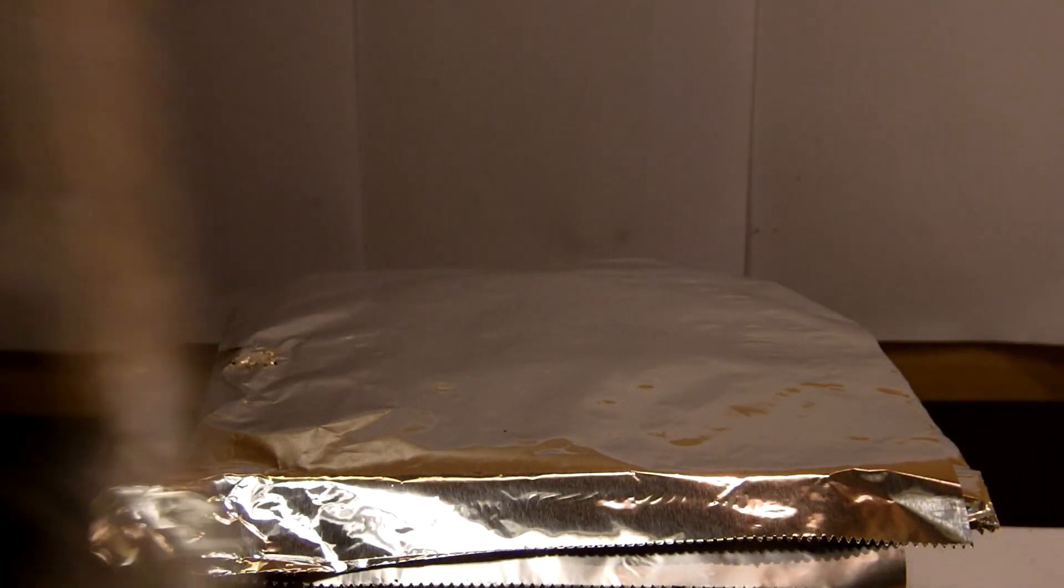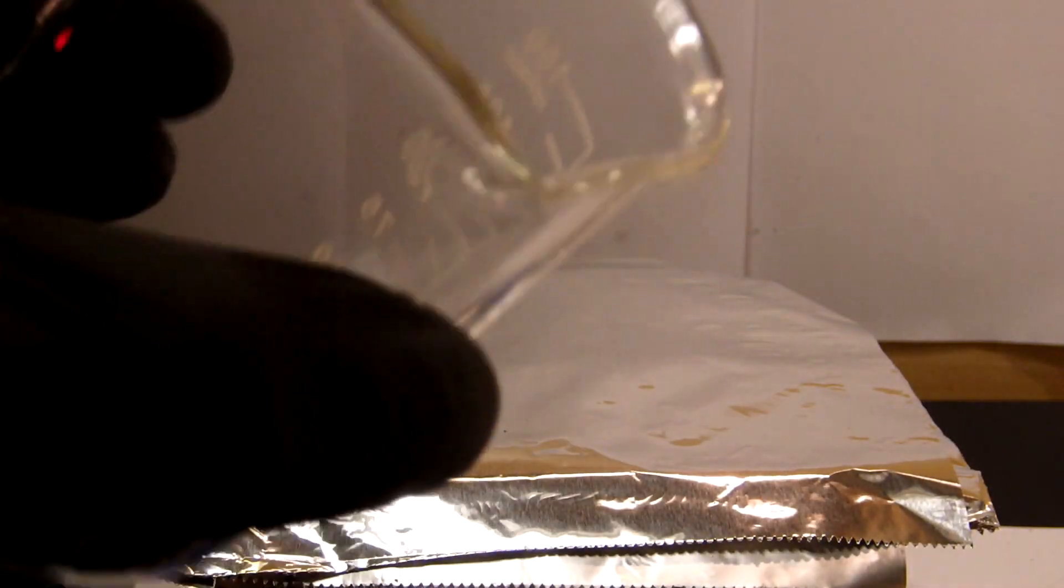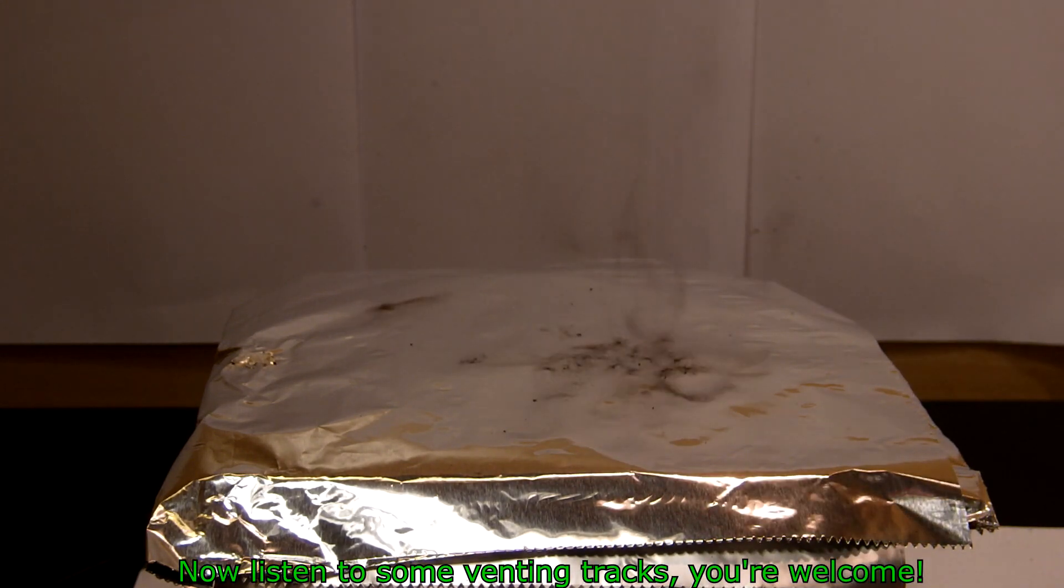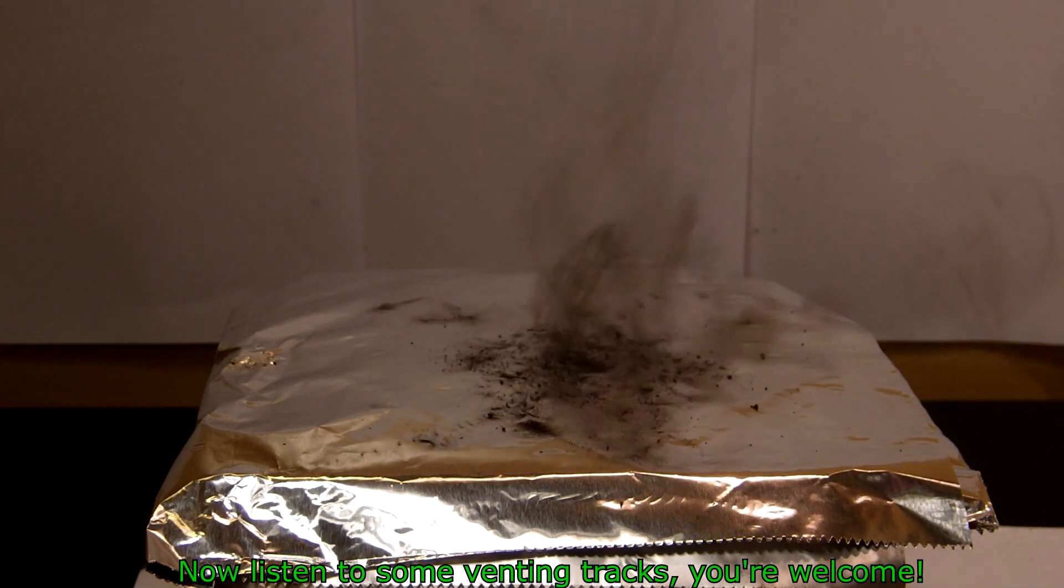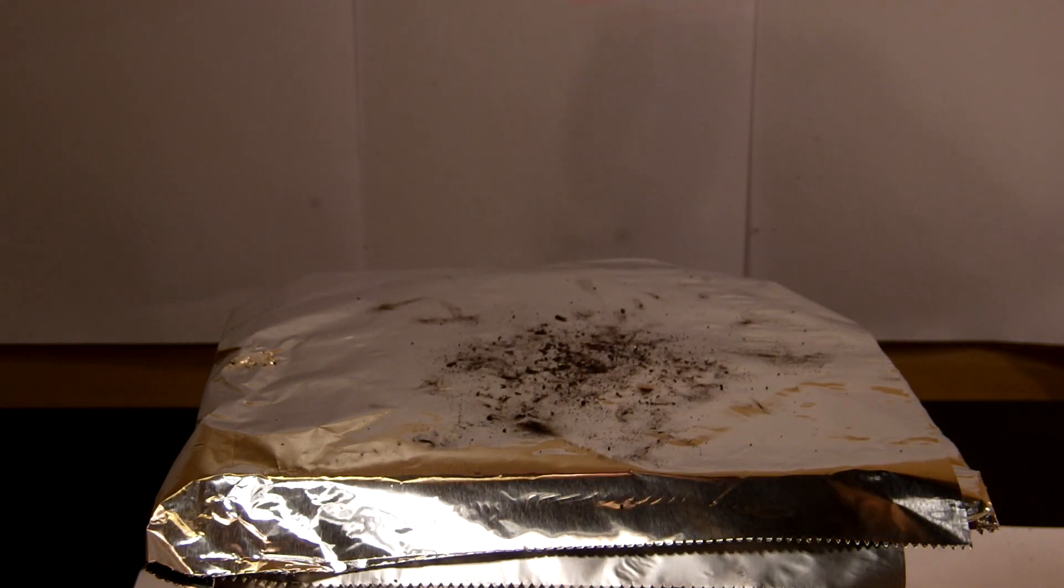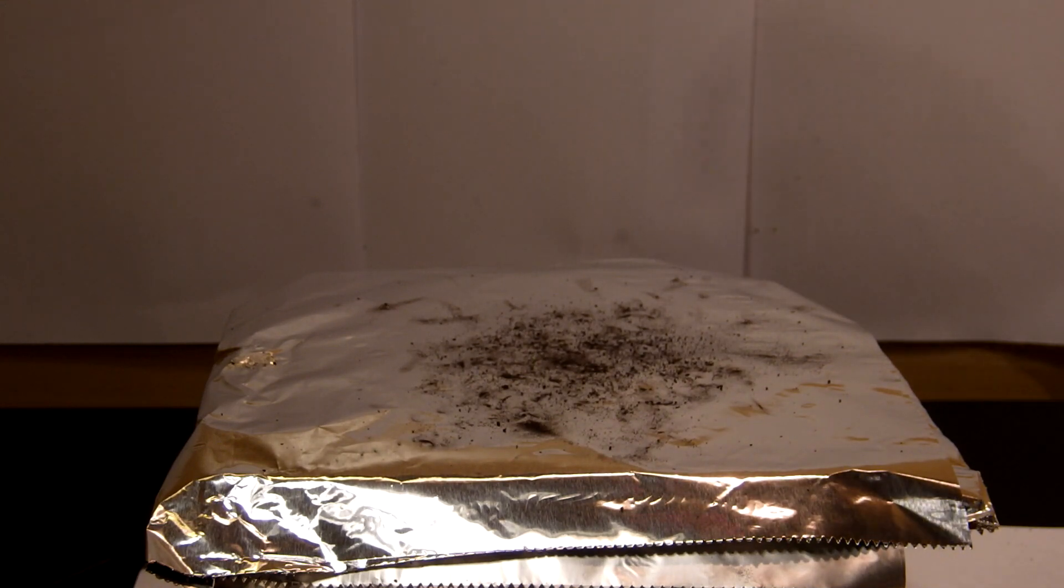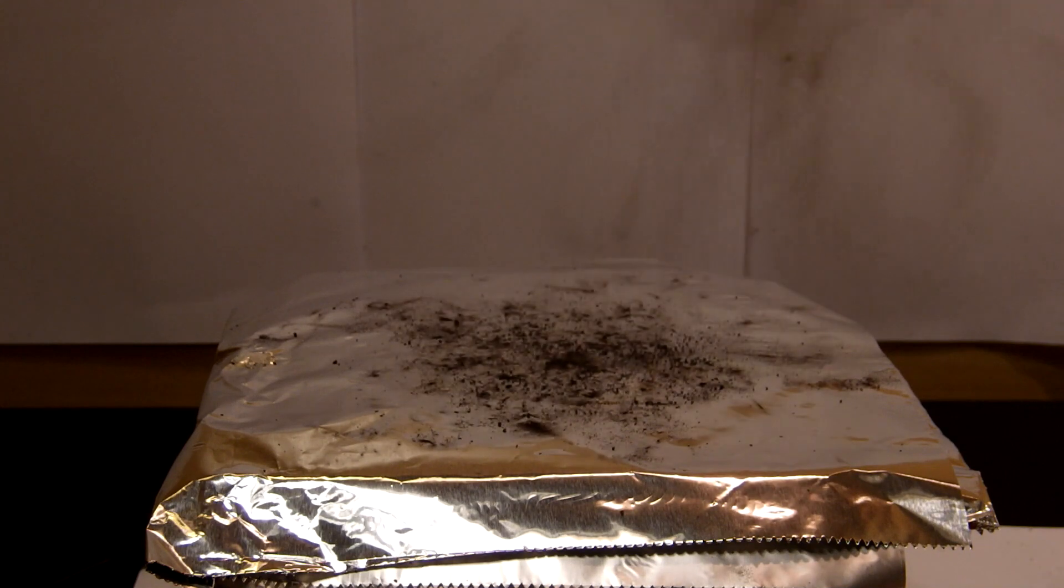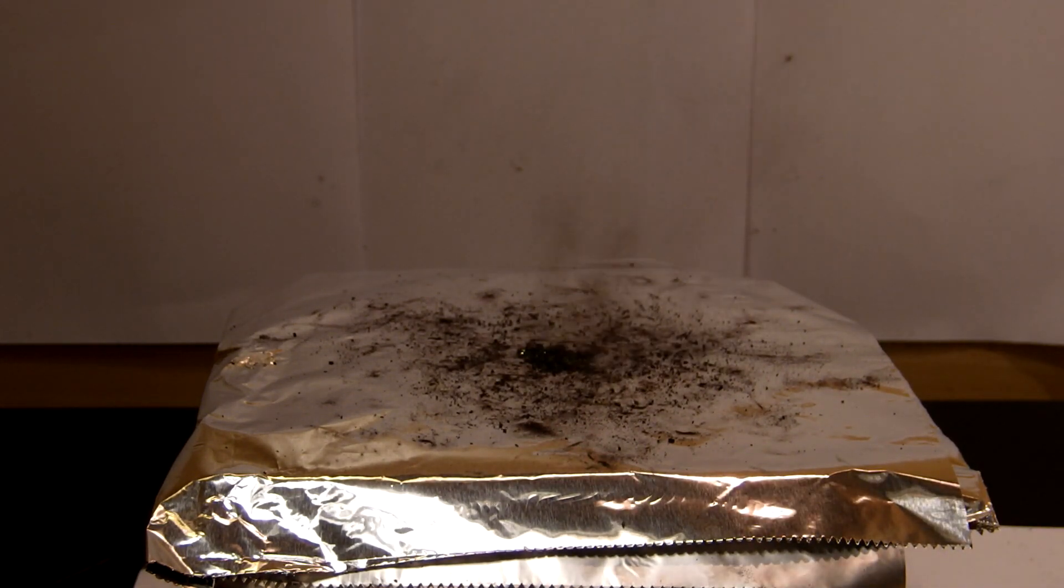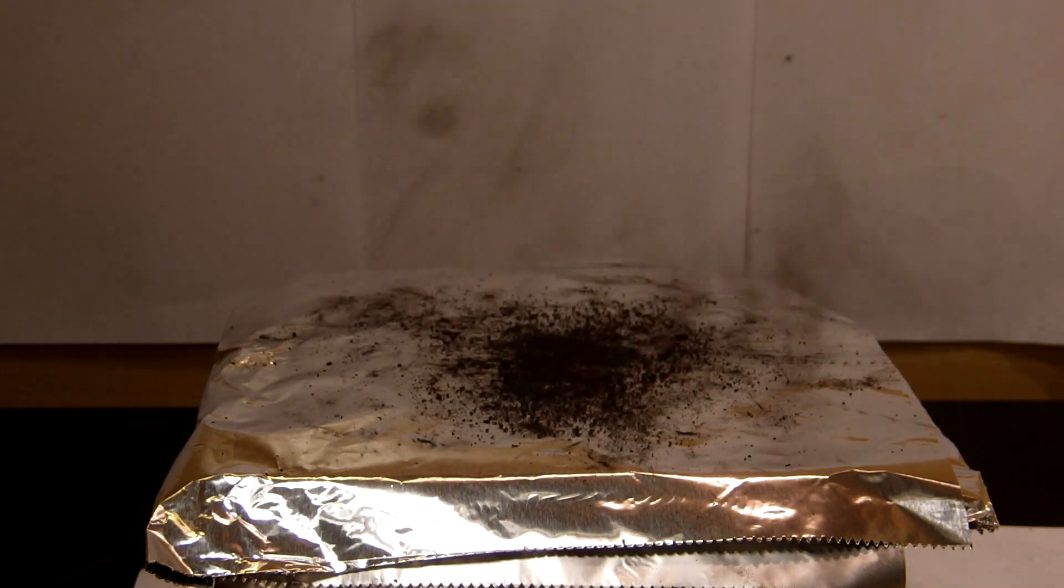When you heat potassium permanganate, it cracks and jumps everywhere, releasing oxygen, but look what happens with ammonium permanganate. I don't know how many crystals fly like rockets with those manganese dioxide trails.